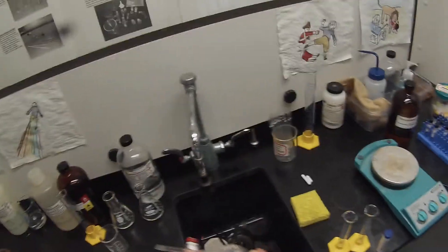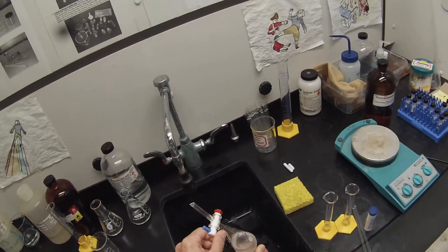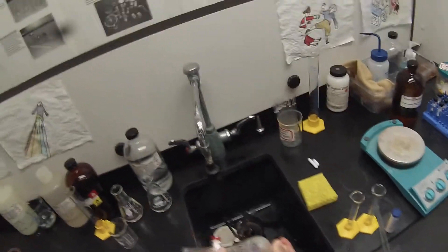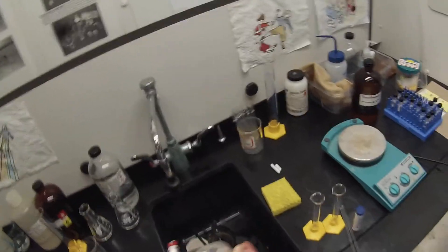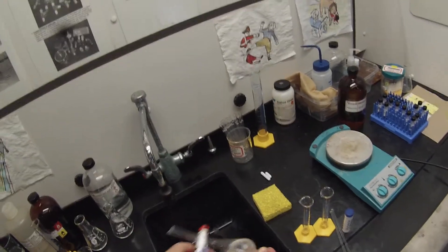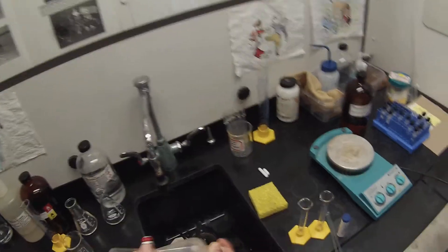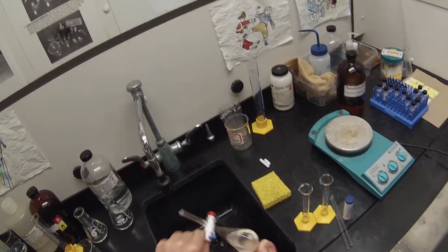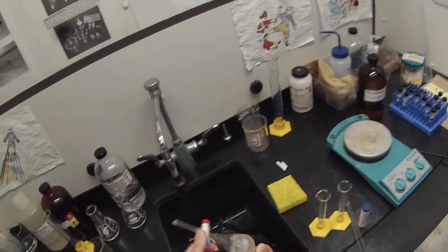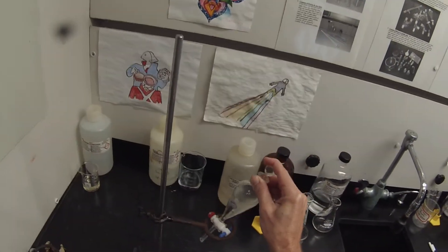We're just going to shake that around. Hopefully the citrate ion is deprotonating the carboxylic acid and not deprotonating the phenol, so we're going to get our sodium salt of cinnamic acid, sodium cinnamate, into the water layer and leave the vanillin behind, if all goes well. We'll just let those layers settle.